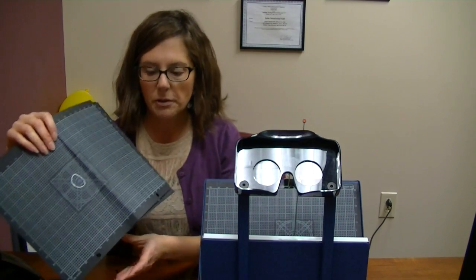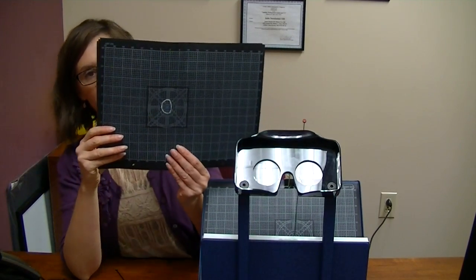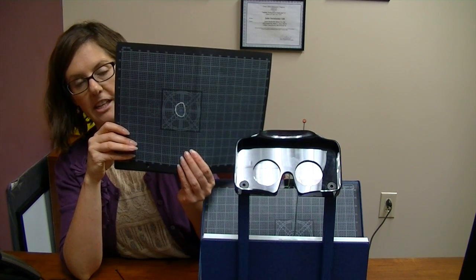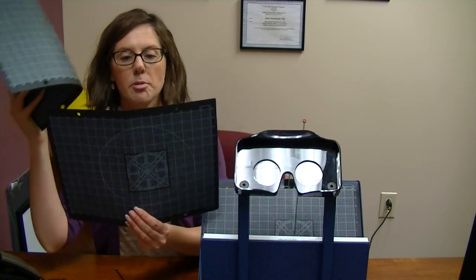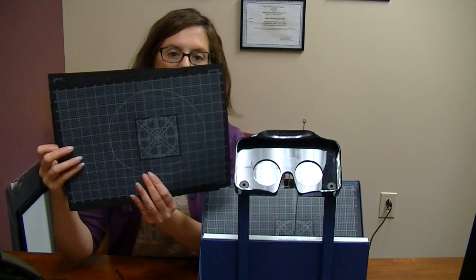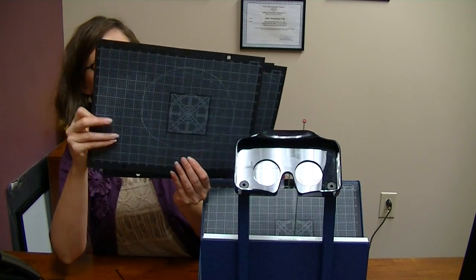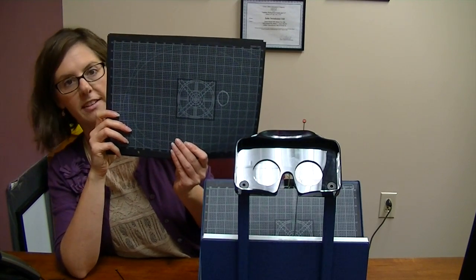I'm going to show you a few small examples here today. This one would be a very severely restricted range — something we typically see for individuals who have ADHD. As we start applying Photosyntonics Light Therapy, the range will increase to a midway point, something like this. And then as we progress even further, we'll get to an ending point, something like this.